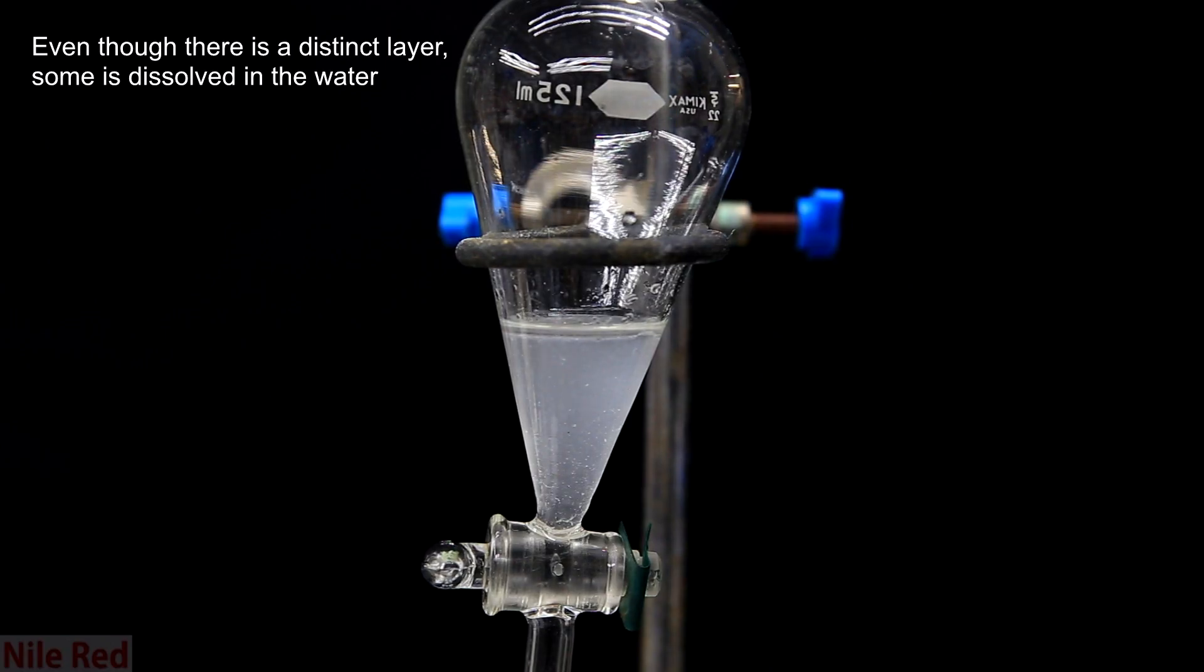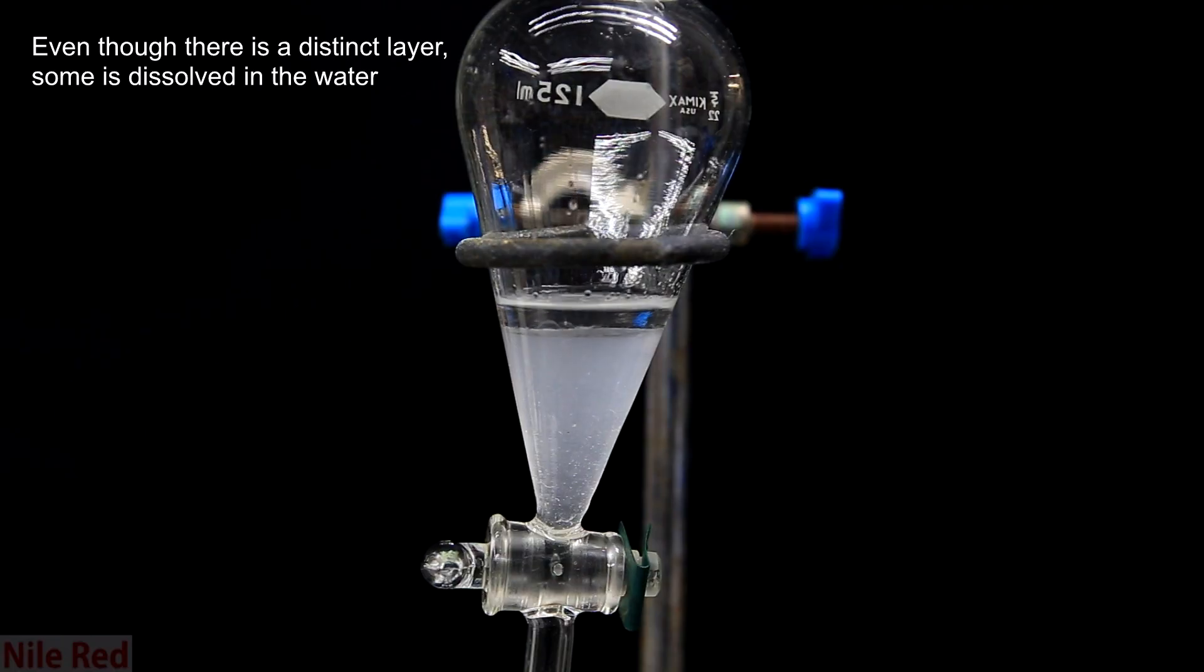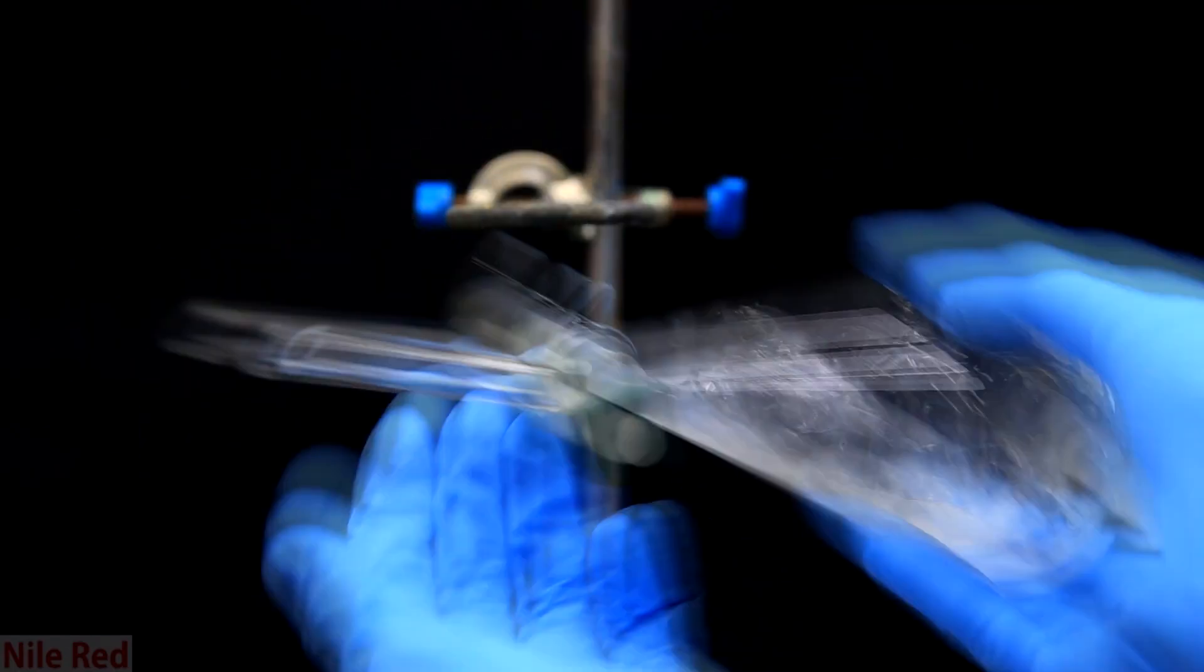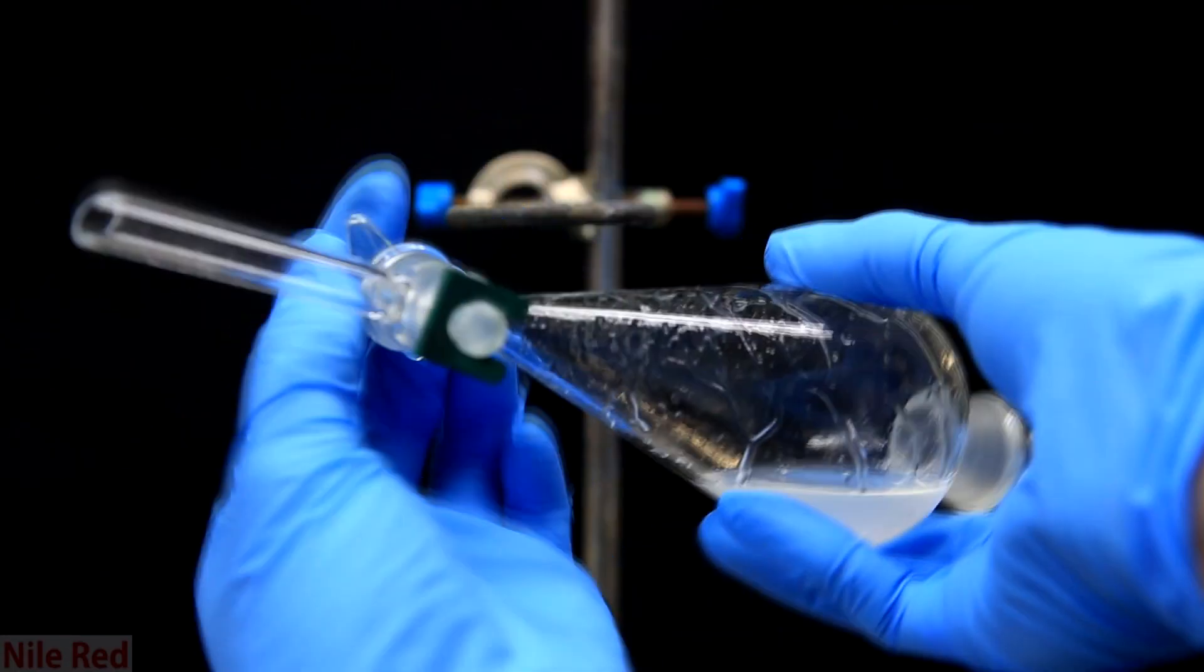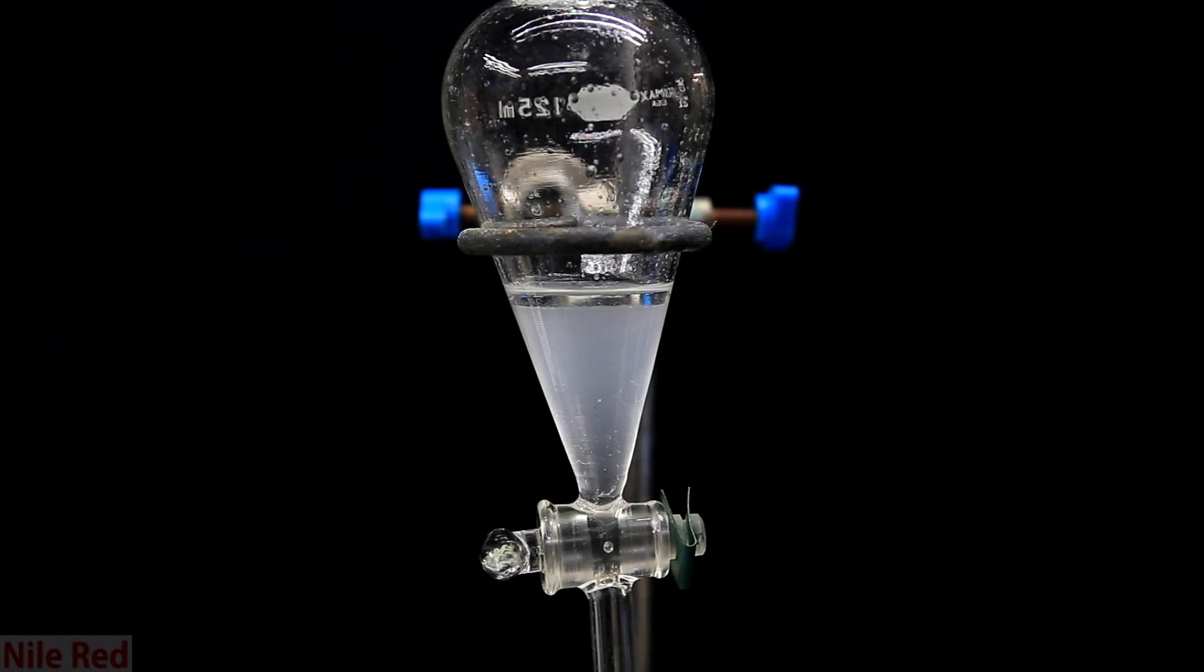Now it's time to extract our desired product from this mixture and so we add 5 milliliters of diethyl ether. I then shake up the separatory funnel with frequent venting to make sure that no pressure builds up. Once I feel things have been thoroughly mixed I put it back on the stand and I let the layers separate.